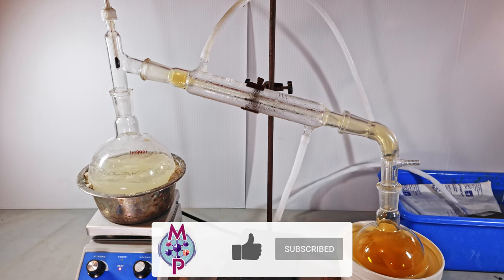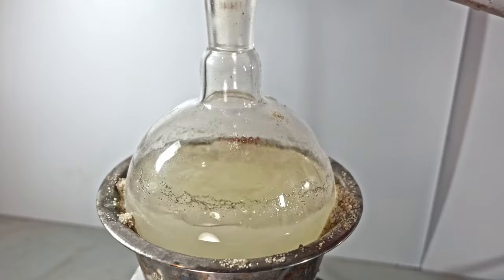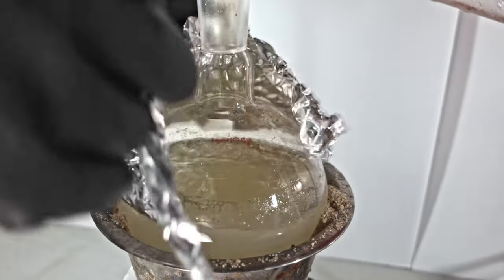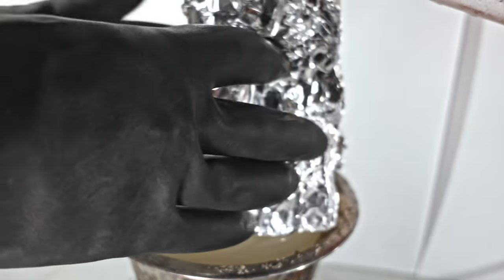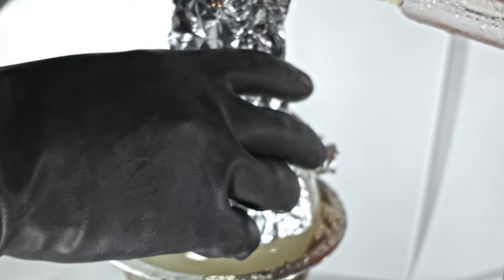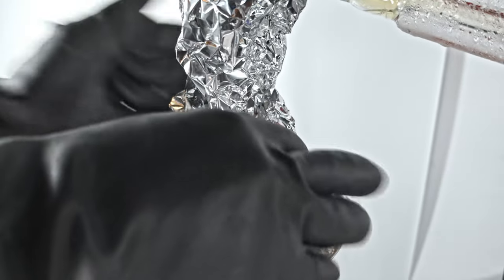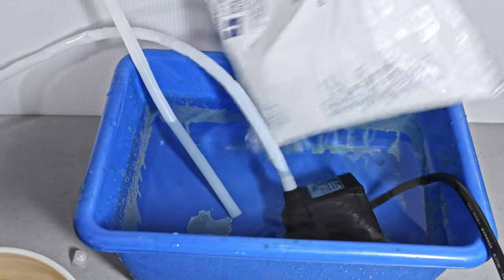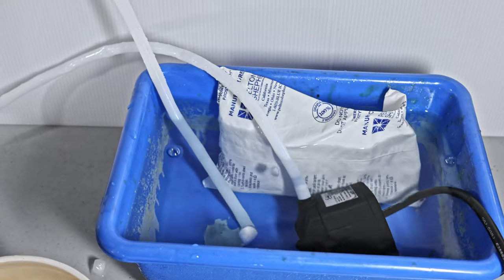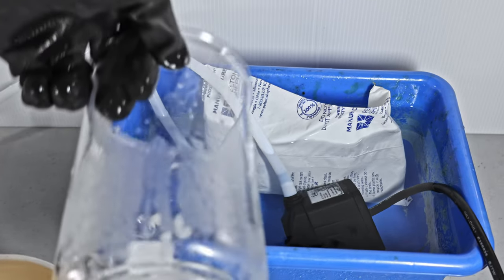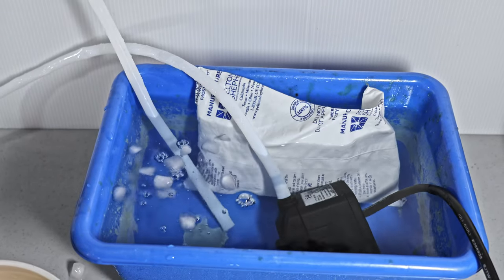Once your reaction starts going, you're going to need to make some modifications. The first thing you need to do is wrap your flask in tin foil. This will insulate heat and shield it from light, which can break down your nitric acid into nitrogen dioxide. You also want to put an ice pack in your water basin. This will keep it cold and your nitric acid will spend less time in the vapor phase.